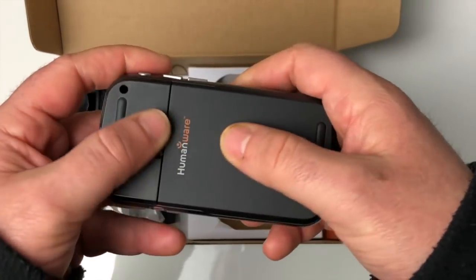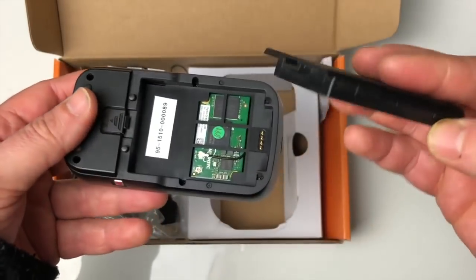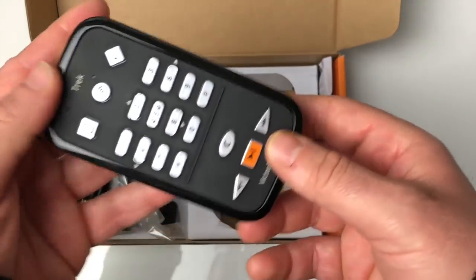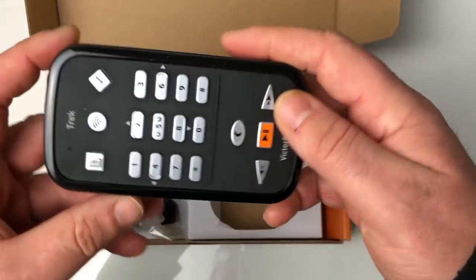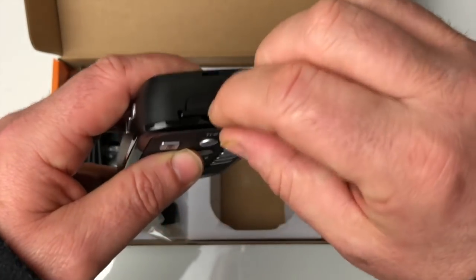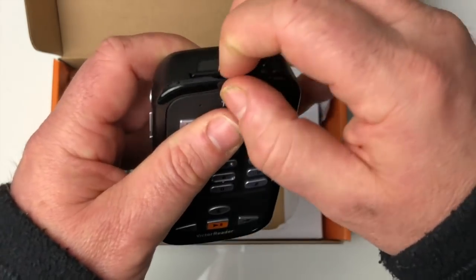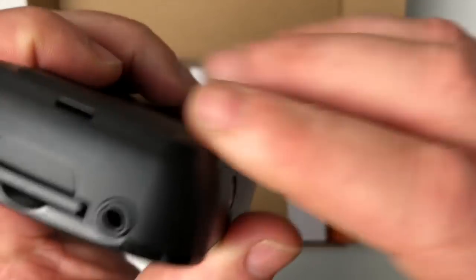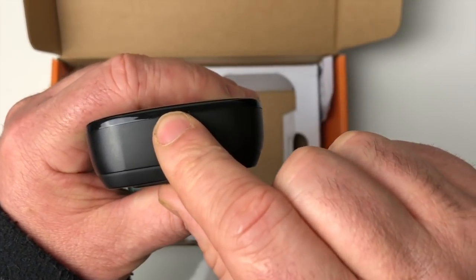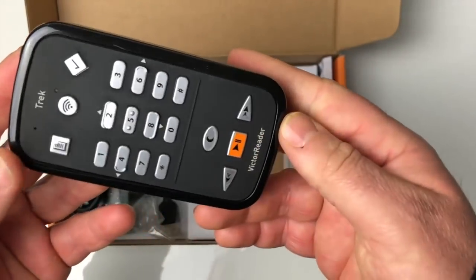La batterie est interchangeable par l'utilisateur via un petit clapet qu'on lève et qu'on éjecte. On peut voir que sans problème, on peut soi-même changer cette batterie. Pour la remettre, c'est pareil — on referme. Voilà donc le côté hardware de l'appareil. On a en haut le lecteur de carte SD classique HC. On a juste à côté la prise jack, et dessous l'appareil, le micro USB pour le branchement au PC ou pour le rechargement.